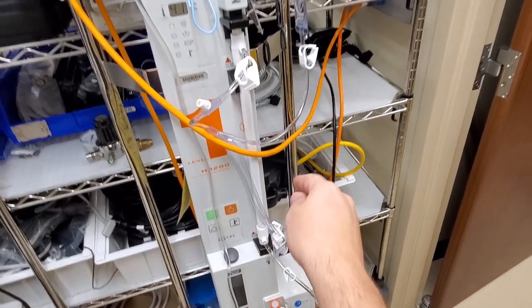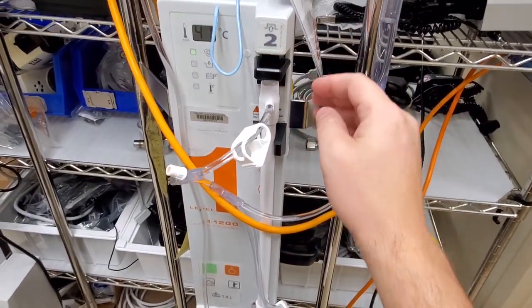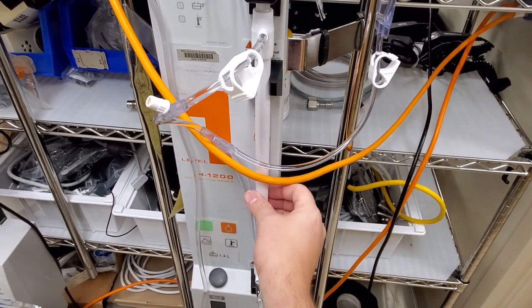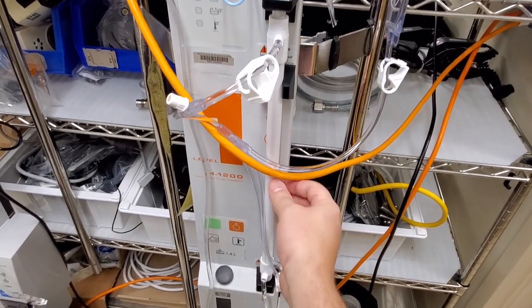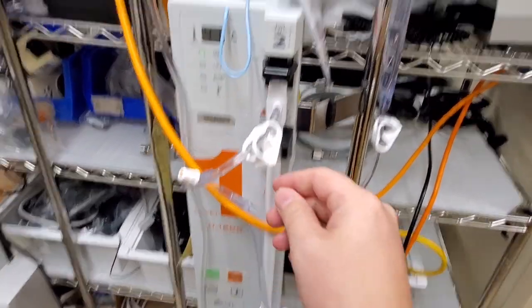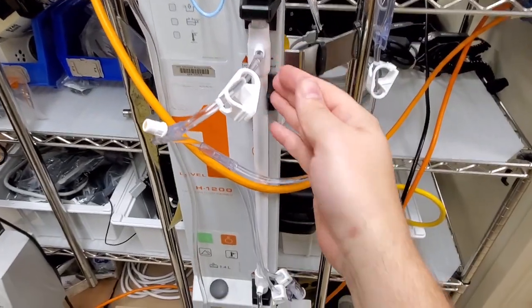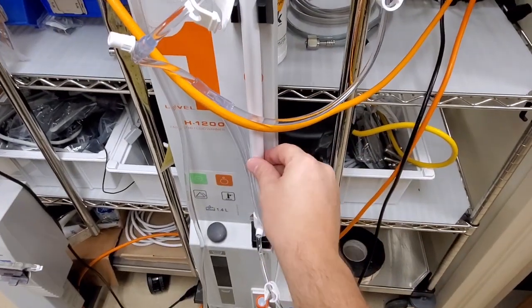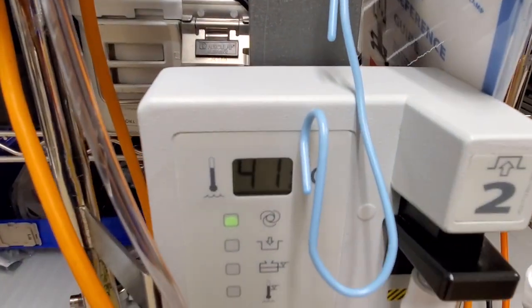Down here you have a consumable tube that snaps in. This pushes down and this is a bifurcated tube, so there's an inner chamber and an outer chamber. The inner chamber is your patient line which comes up from up here, goes down into here and it flows through it while it's being heated. This tube is very warm. You can see that it is 41 degrees.